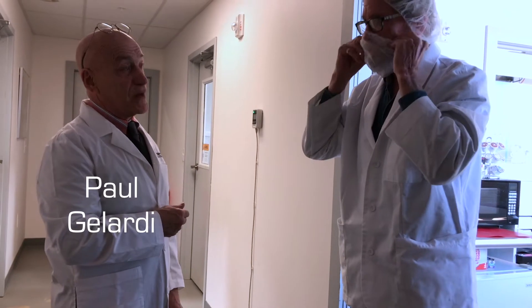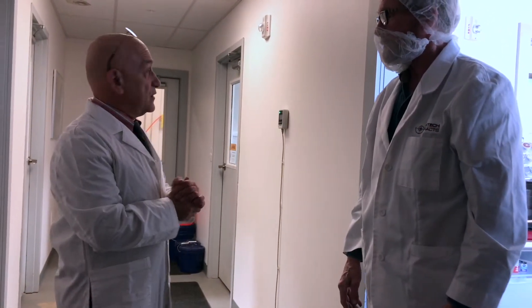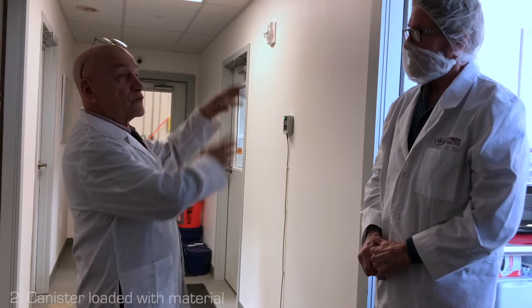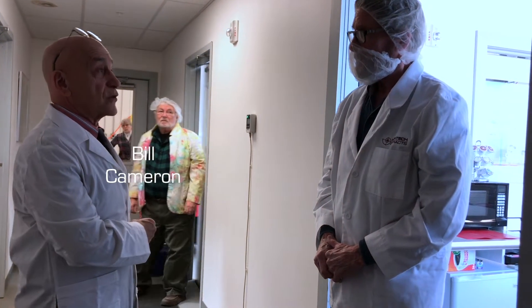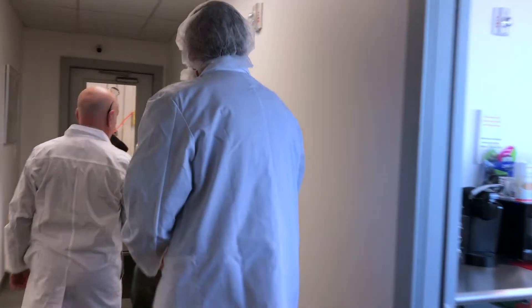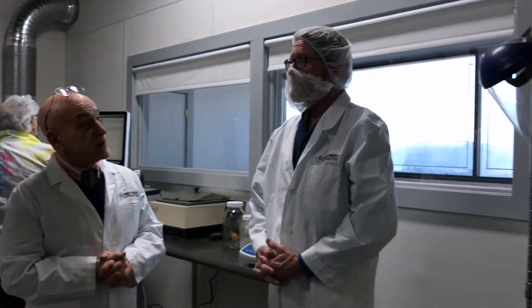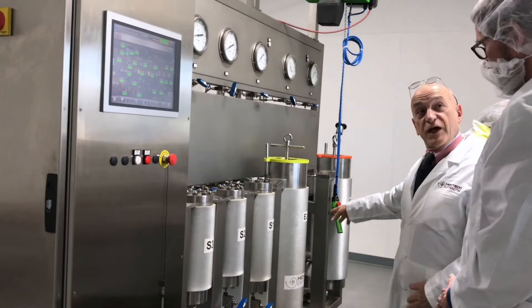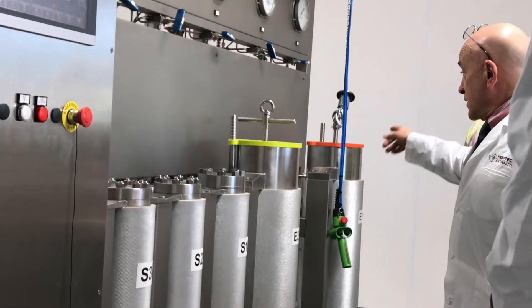Gordon and I go way back. So here's what's going on: you've got your material ground in a canister, the canister went into the extraction system. Bill Cameron set up the parameters and we're going to go in and you're going to run the extraction. Come on — this is our SCFN Rule Seven extraction system. It's seven vessels with a five-liter canister, and we loaded the five-liter canister with some of your material.